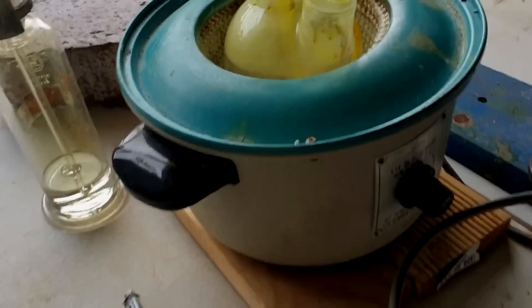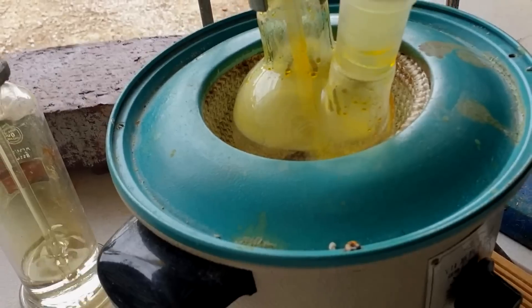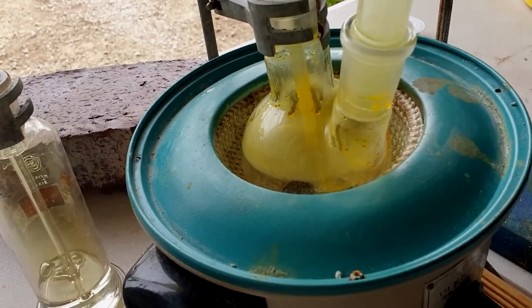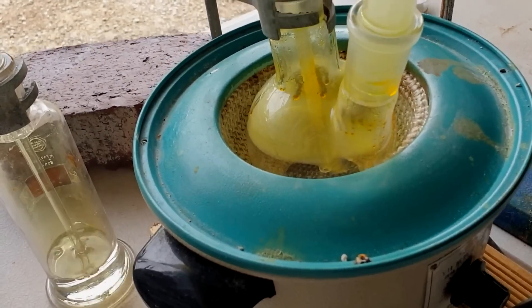We're starting to get our first hints of sulfur chlorides. Look on the edges there — liquids. Hell yeah. You can see it reacting in the flask there, and those sulfur chlorides starting to reflux over that horrifying looking sulfur at the bottom.